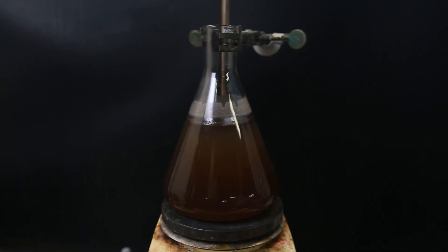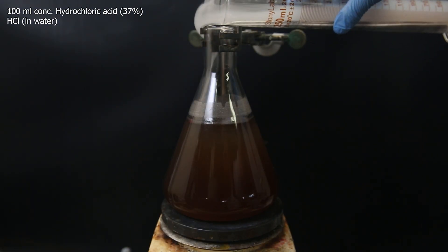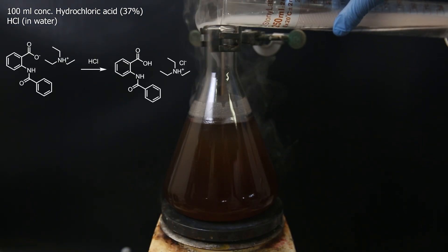When that's done, it looks a bit more cloudy. And now, to precipitate out the product, I add a total of 100 ml of concentrated hydrochloric acid.